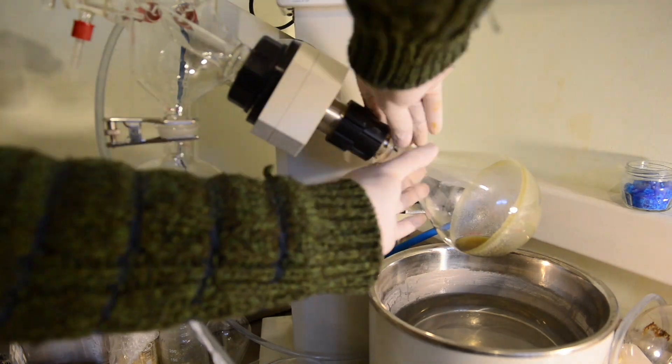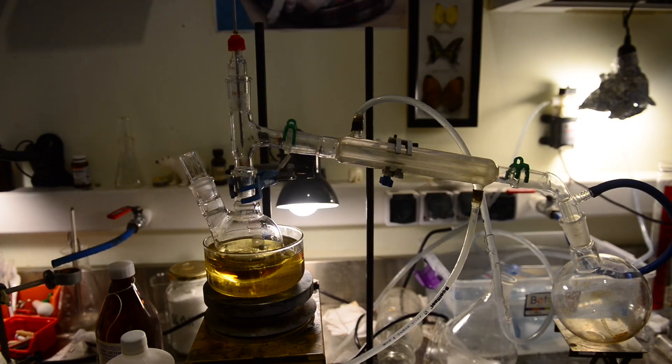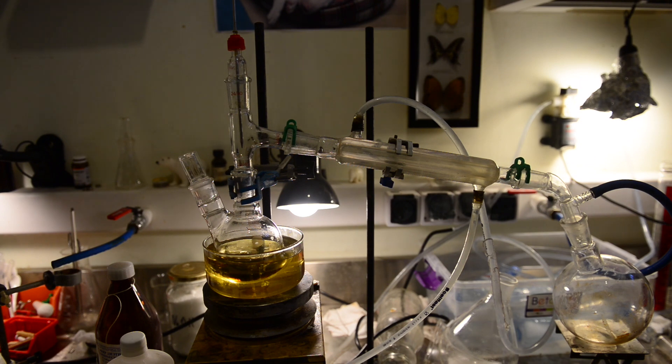Using rotovap turns out not to be as efficient because we had to use the chloroform to wash the flask and the funnel and had to distill off the solvent once again. Unfortunately, during all of these manipulations loss of some products is unavoidable.